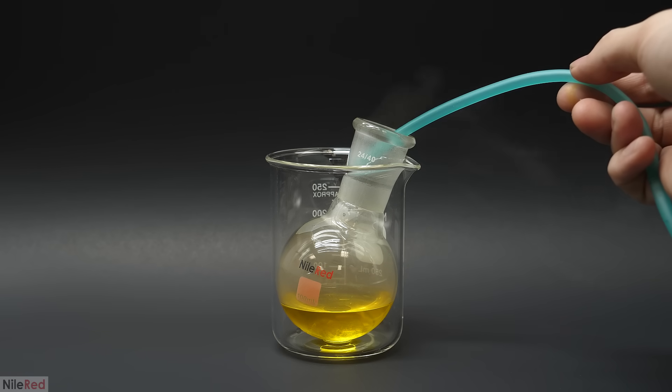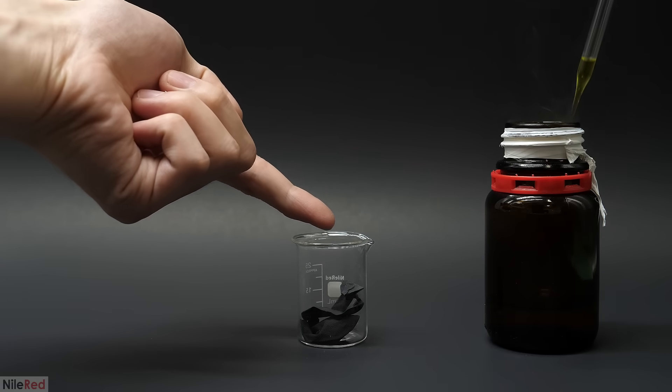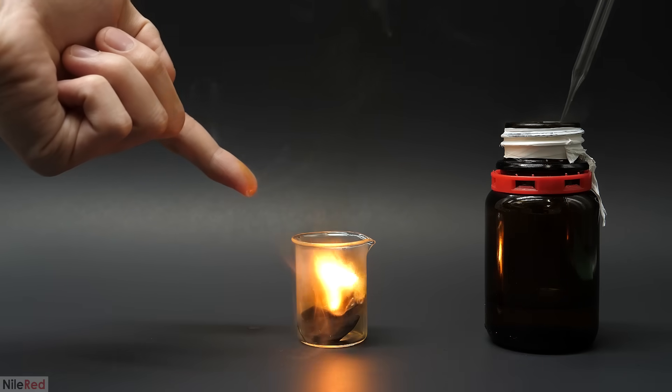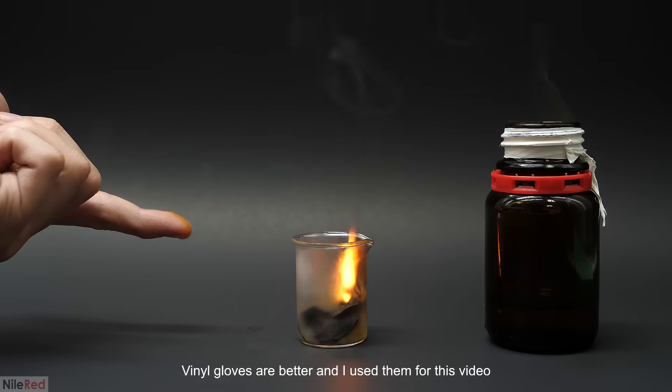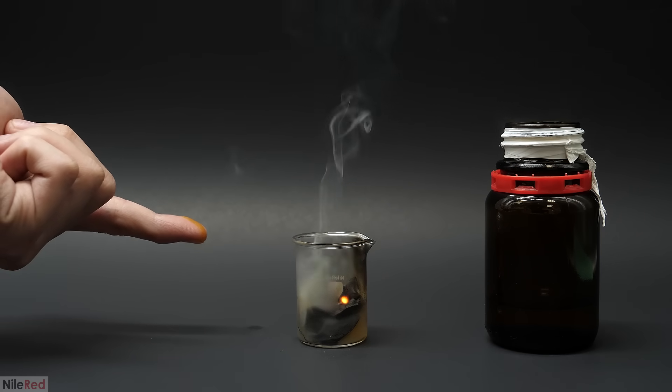A few months ago, I made some super concentrated nitric acid, which was close to 100%. My main purpose with that video was to explore some of its different properties, and of course, to also show that it could light common lab gloves on fire. So when working with it, you either need to use a different type of glove that's chemically resistant, or to just wear none at all.